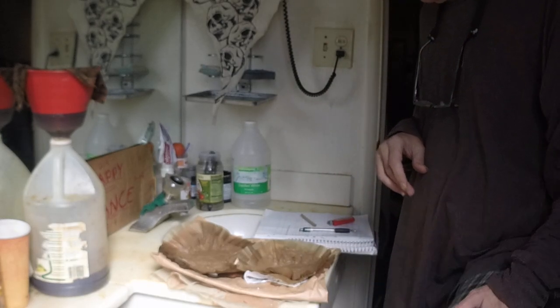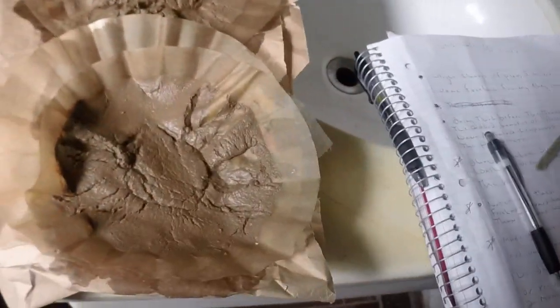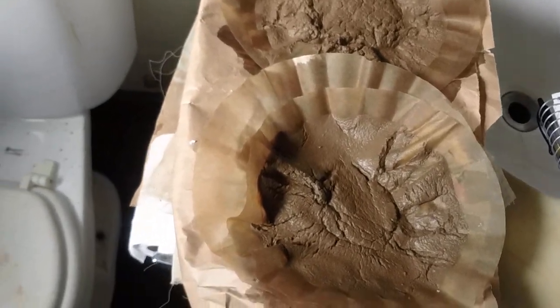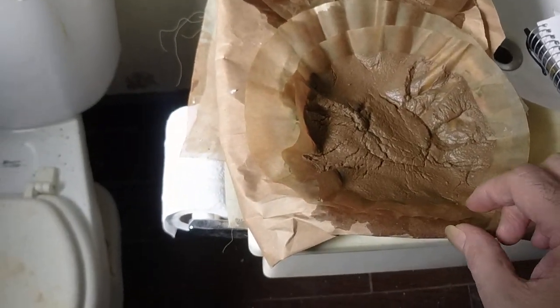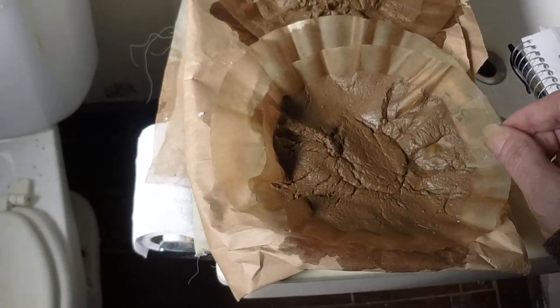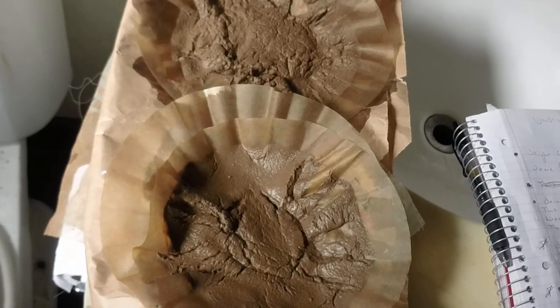I got like half a metric shit ton — there's like a quarter metric shit ton right here. And again, this is out of 500 grams of seeds, so call it a pound of seeds.